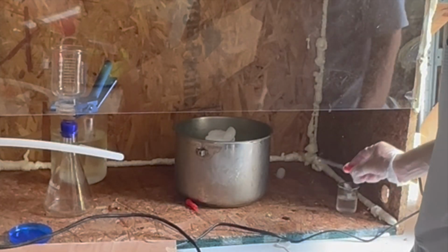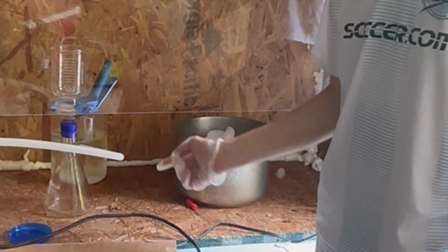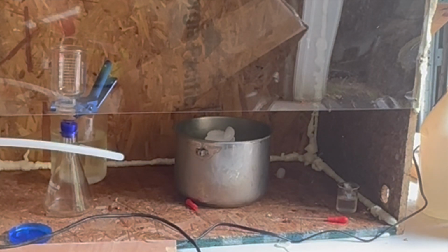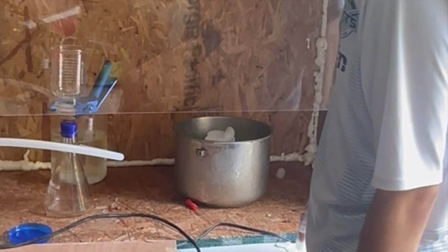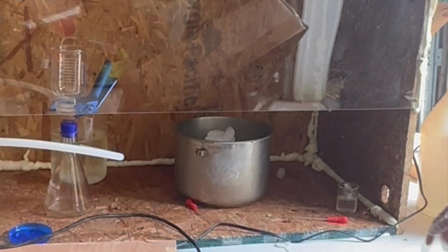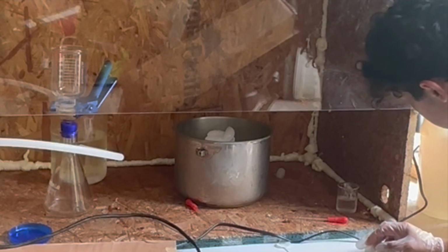I'm shooting in the peroxide through the little pouring hole. This is for once it's all precipitated. It seems like it's dissolved in solution, which isn't good. That's not good at all, actually. That's why I'm going to let it cool off.